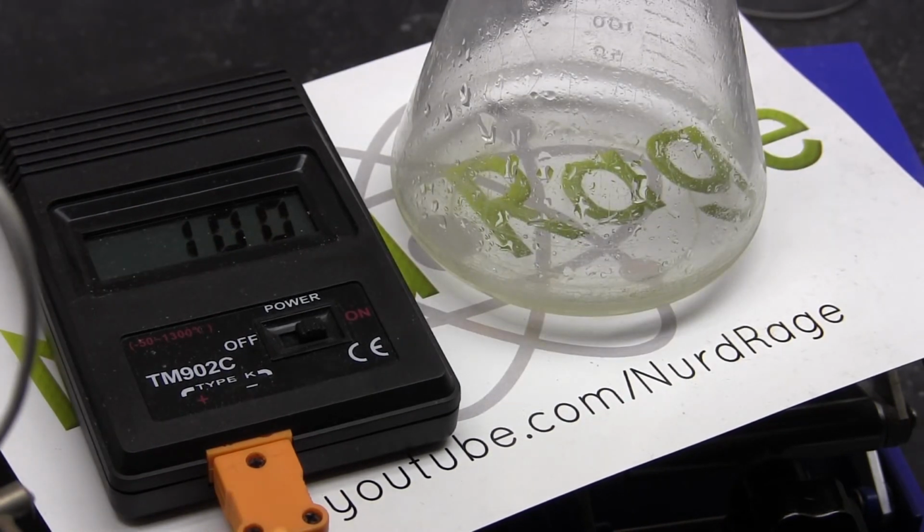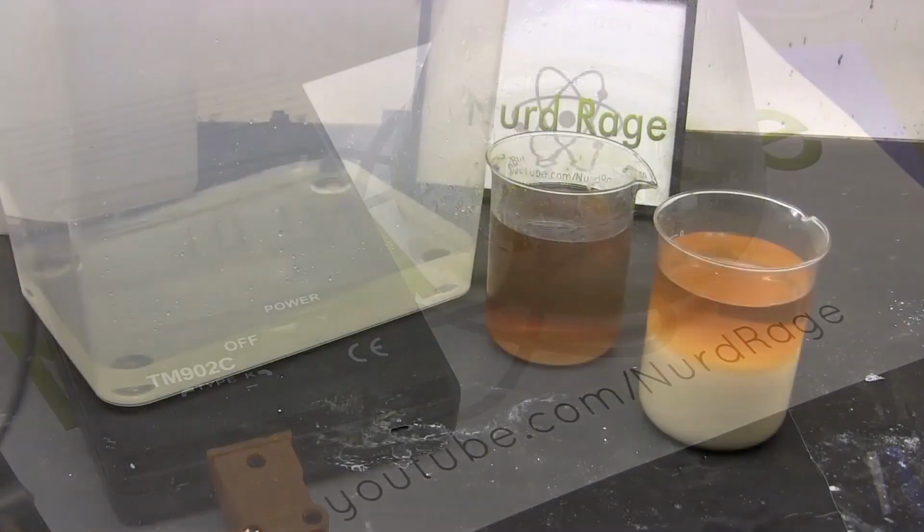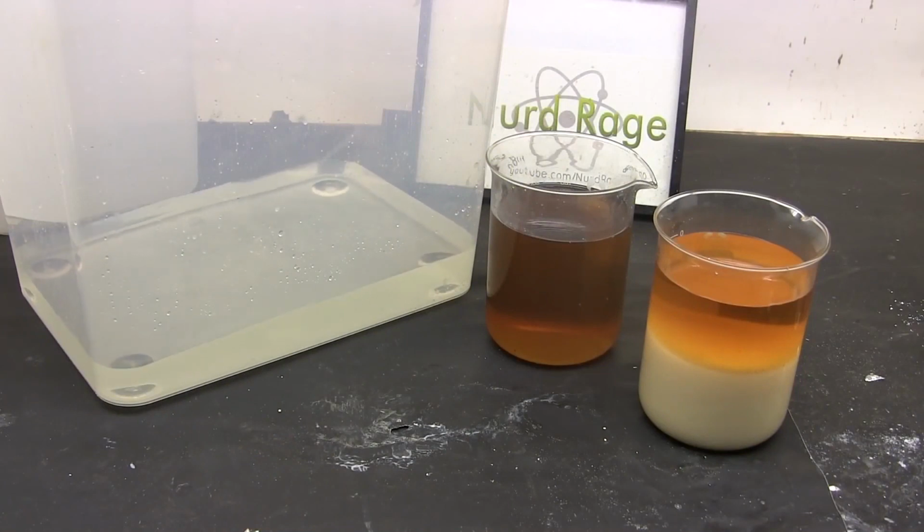Since we use an excess of hydrochloric acid, it will start distilling after we've exhausted most of the water. When the temperature of the distillate starts rising beyond 100 degrees, we are beginning our transition. I stopped my distillations at around 103 degrees. So here we are with over 2 liters of distillate containing water and propionic acid, as well as around 2 liters of residue that contains mostly hydrochloric acid, less volatile organics, and salt.